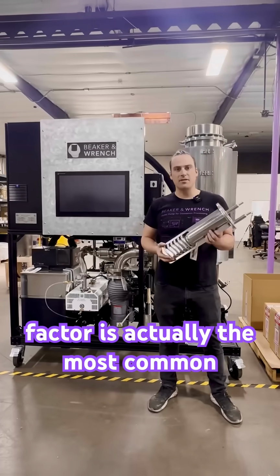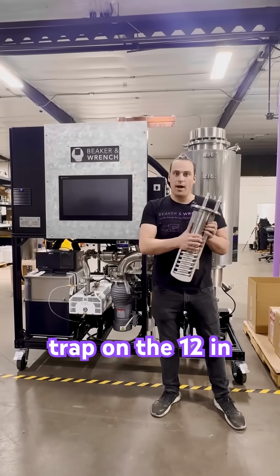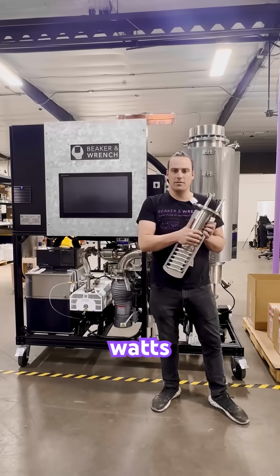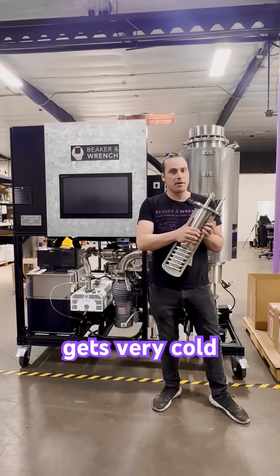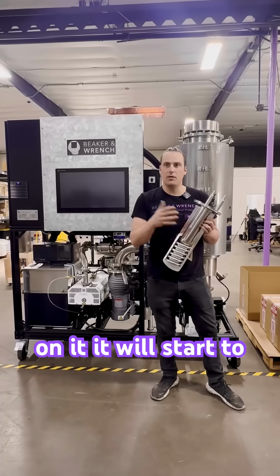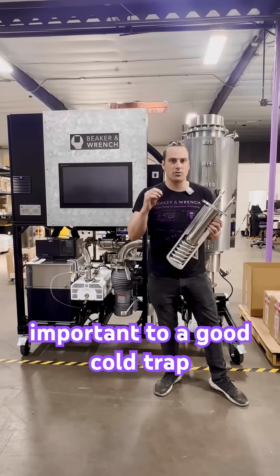The second limiting factor is actually the most common, and this is a good example from our cold trap on the 12-inch. This immersion probe only has about 100 watts of cooling power, not a lot at all. It gets very cold, but if you try to condense a lot of volume on it, it will start to warm up and it won't get that very cold temperature that's so important to a good cold trap.